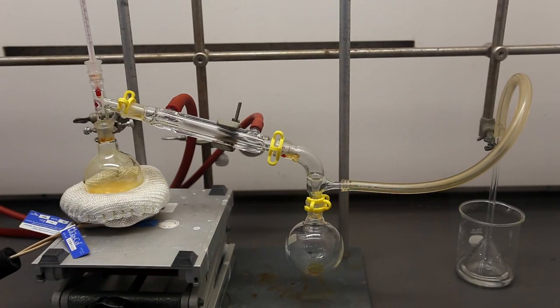When the distillate changes from milky white to reddish brown, the collecting flask and the trap must be changed. Replace the collecting flask with a clean, empty round-bottom flask, and replace the NaOH trap with a small amount of water.